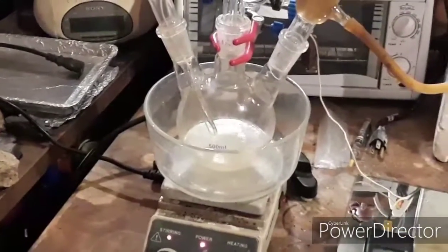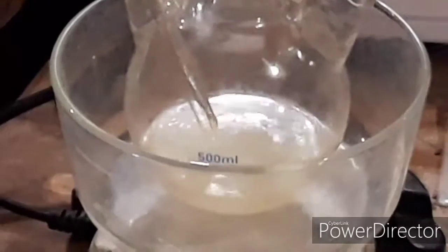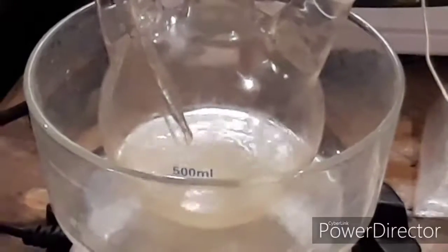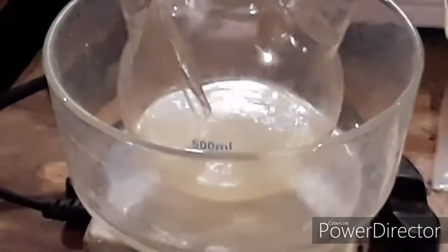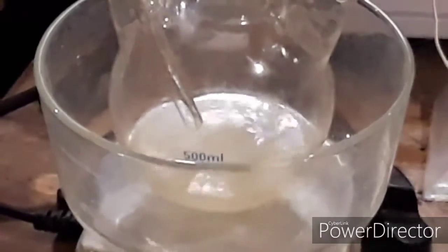For the basic setup, I have a 500 mL round bottom flask. You could get away with a 300 mL one, but I like the extra volume in case of any unexpected boiling, to keep everything from foaming up into places we don't want it to go. The flask is sitting in a glass dish because it will have an ice bath surrounding it.